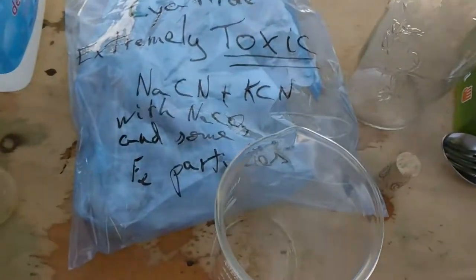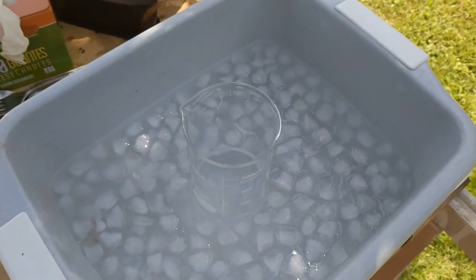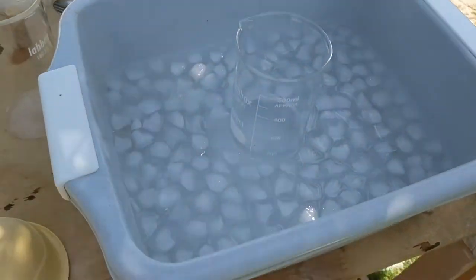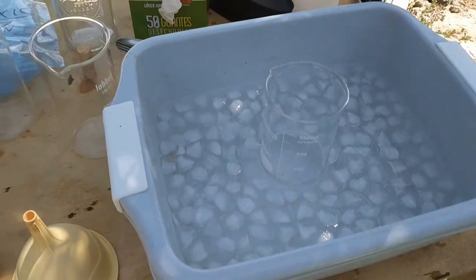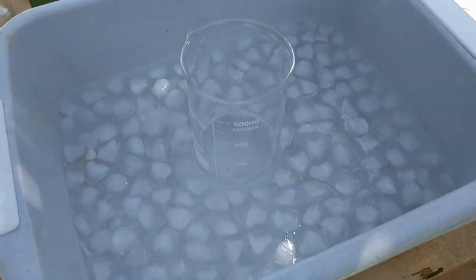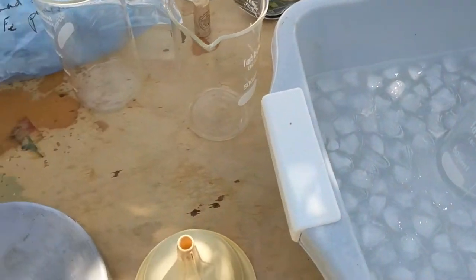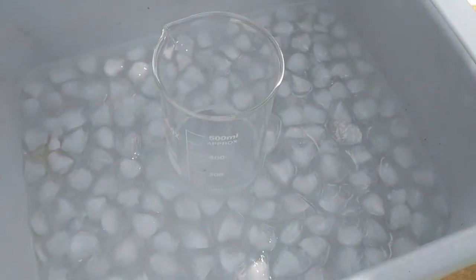The whole point of this is that I'm going to be cleaning up my cyanide, which I made just two days ago by reaction of sodium carbonate with potassium ferrocyanide. What I'm going to do is dissolve it in this basic solution so that I can then get the particles of iron out, and then try to make some silver plating solution.